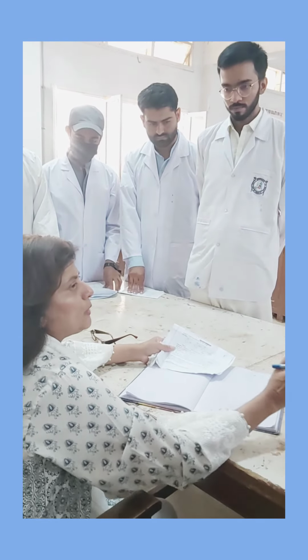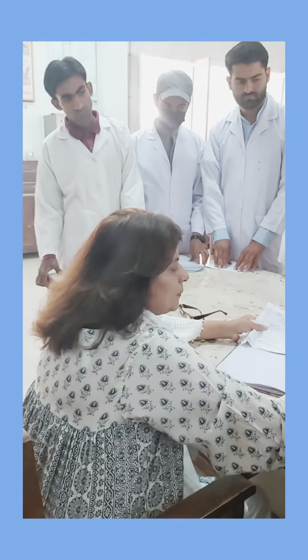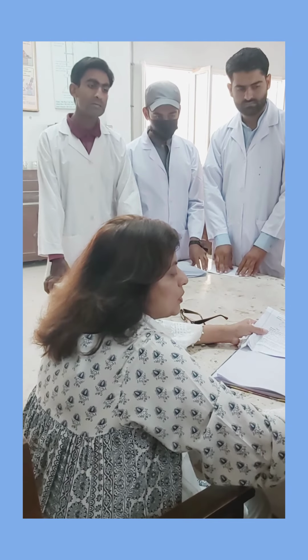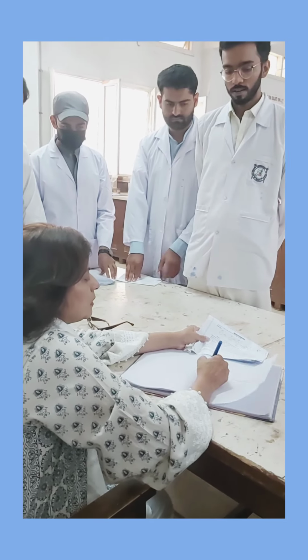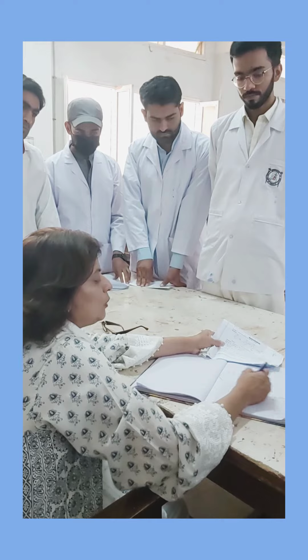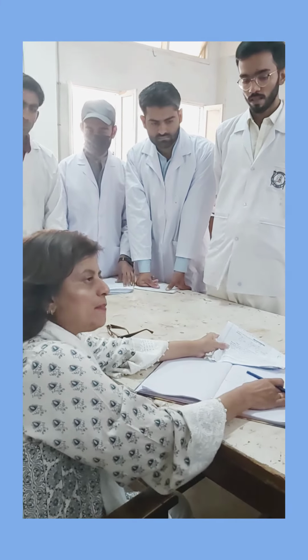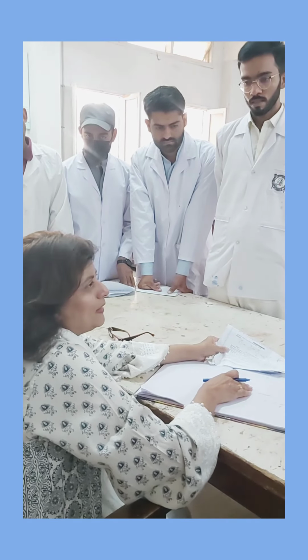Now I want to ask you, do you know what is a round bottom flask and what is a flat bottom flask? What is the difference? I can show you here. This is a flat bottom flask, flat bottomed flask, and this is a round bottom flask. Now they both have different functions. Why a flat bottom flask is used, why in some reactions a round bottom flask is used.